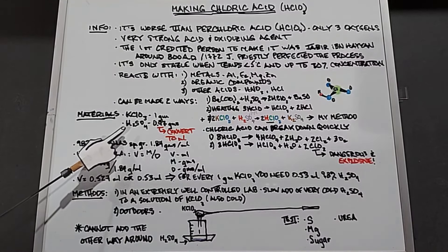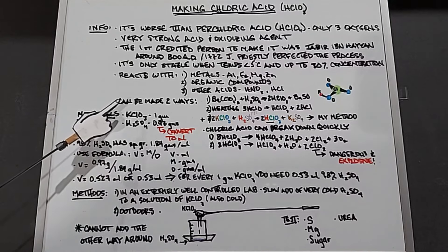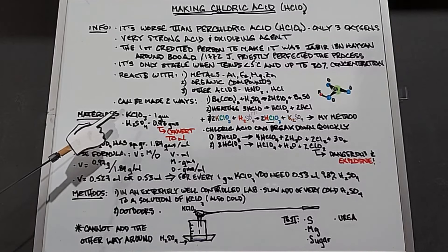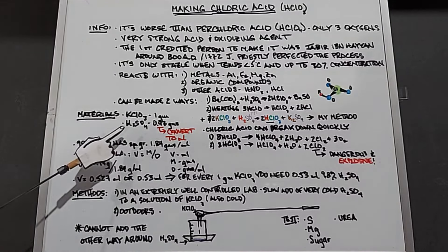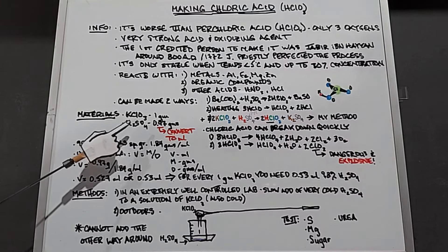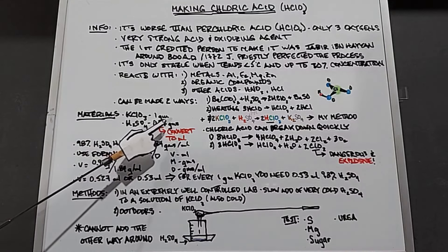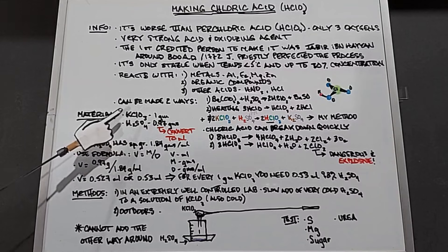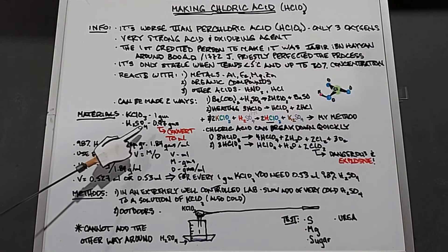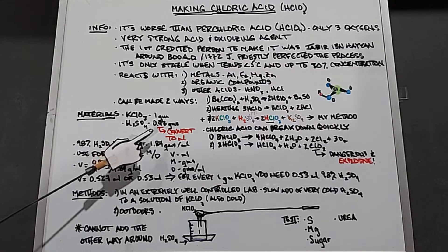The materials we need are potassium chlorate and sulfuric acid. This is 98% sulfuric acid. For every one gram of potassium chlorate solid, we need 0.97 grams of 98% sulfuric acid. I wanted to convert this to milliliters because it's much easier.